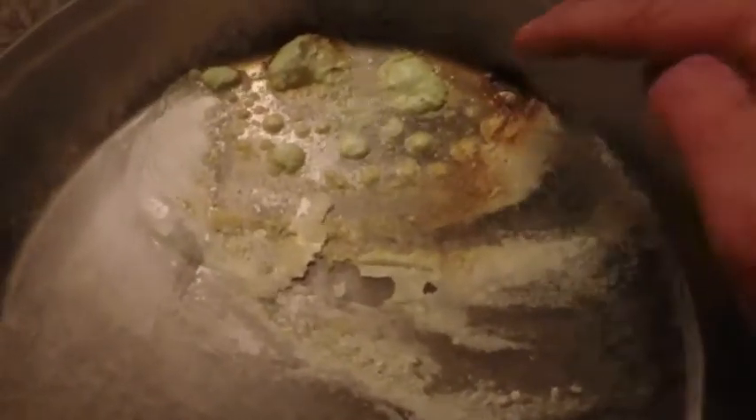Let's make a little room here. What have we got in there? We got some of that. Flip this little fucker over so there's less surface area. Fresh out of the freezer — I don't know if you can see, but it's starting to flake up on its own, which is good. I've got razor blades somewhere but I'll be damned if I can find them, so I'll be using that knife to scrape this up and I'll be avoiding the little burnt patches where I messed it up.